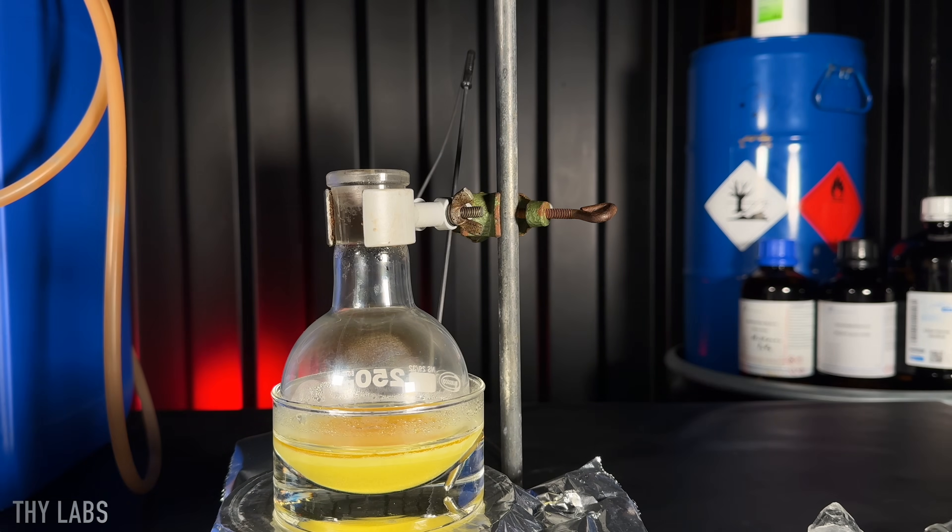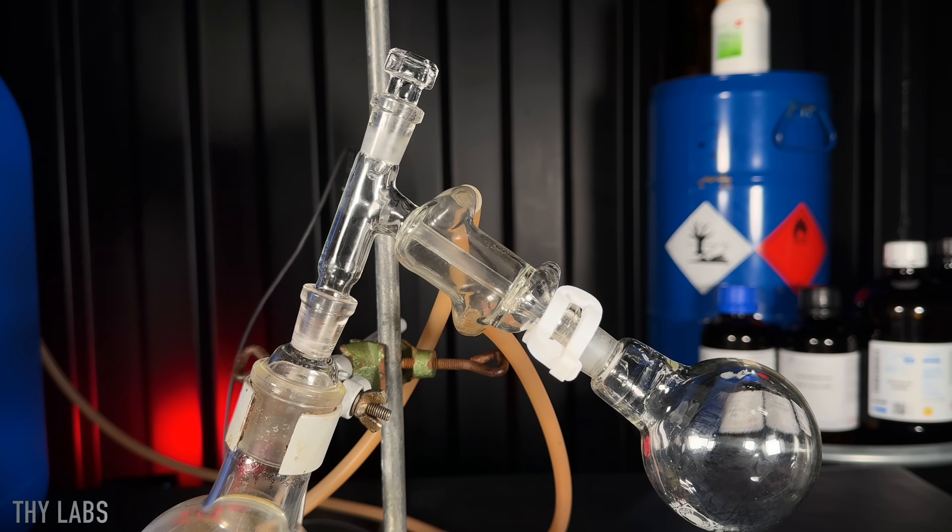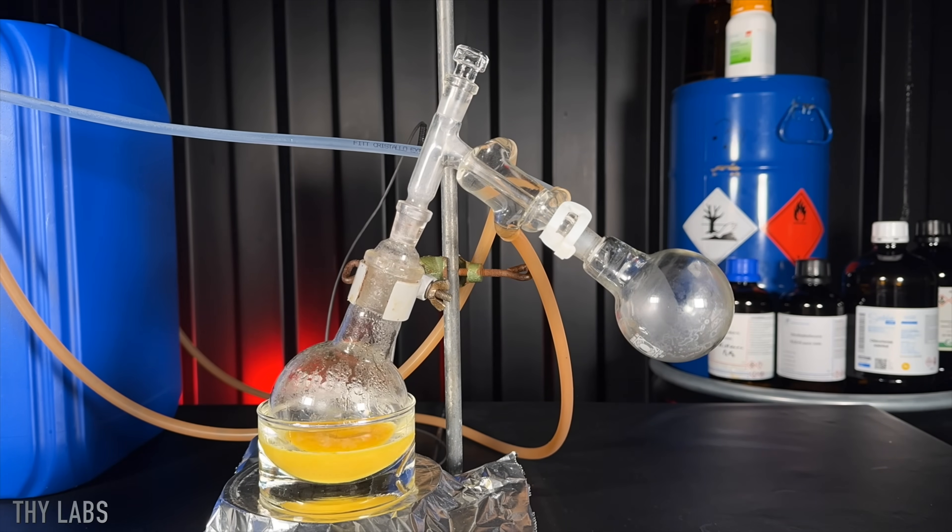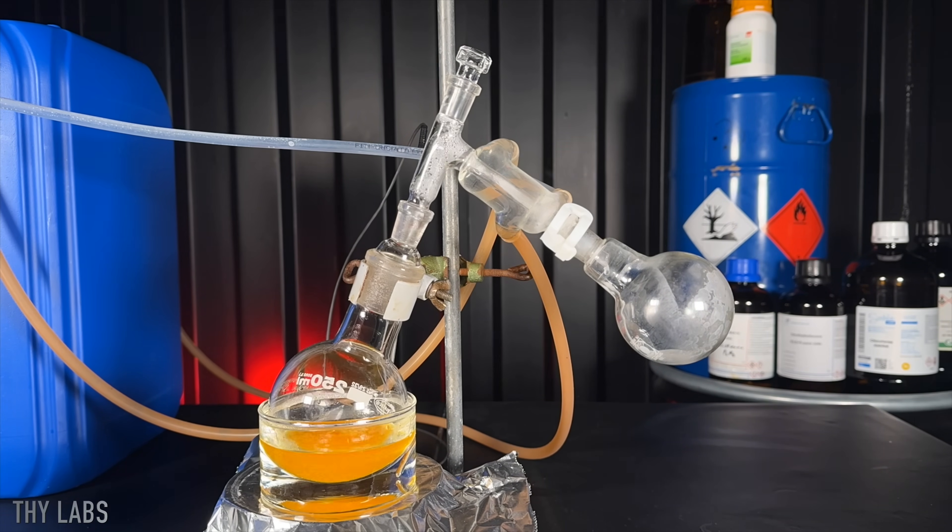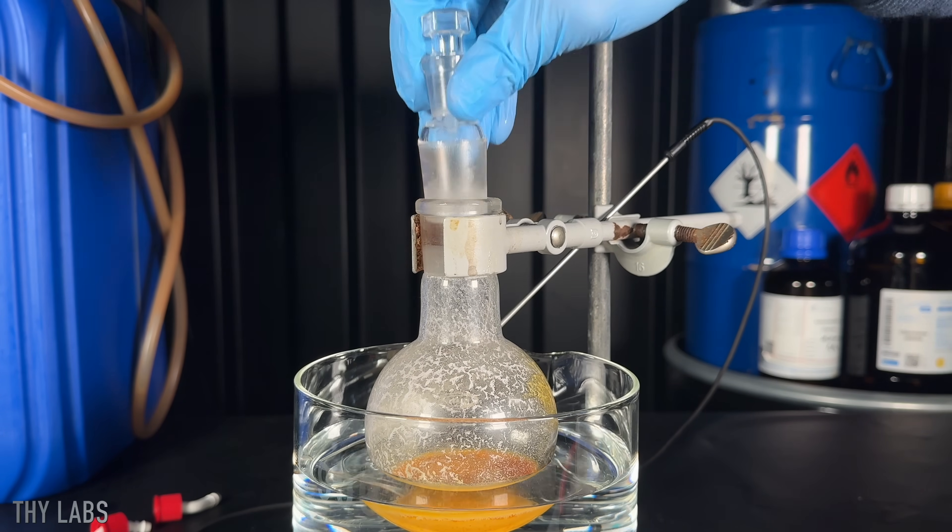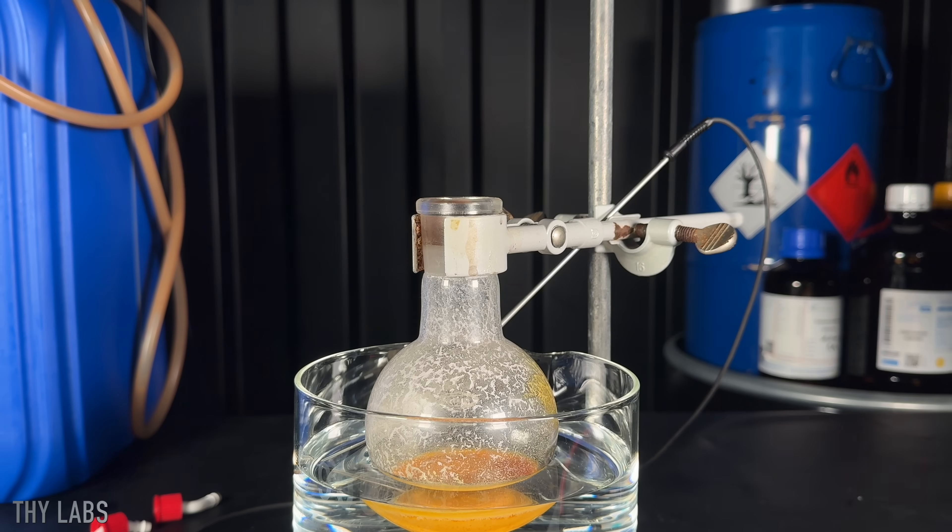Once the reaction was done, I removed the reflux condenser and switched it out for a short path distillation bridge. While I was running the preparation, I thought that removing the formic acid before doing any other step was a good idea. If I did this again, I would skip this step. I wasn't even able to distill a lot of it off and it left some nasty residue in the condenser that was extremely hard to remove.